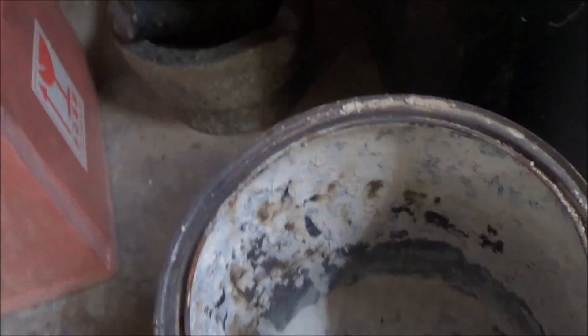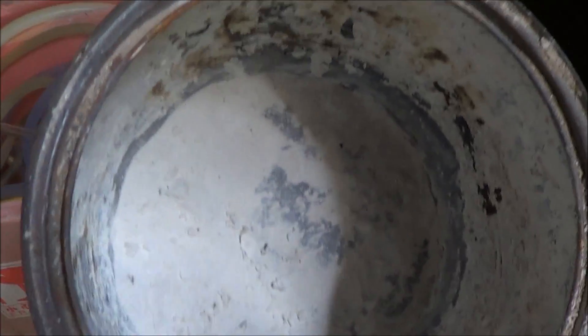Also, we have two grades because I put the rest of the remaining cyanurate in the fire as well, in the paint tin.